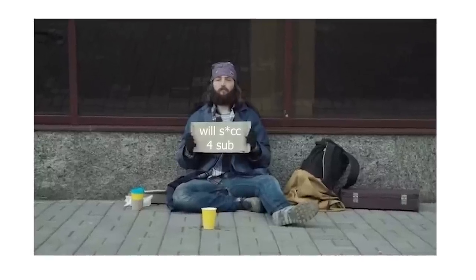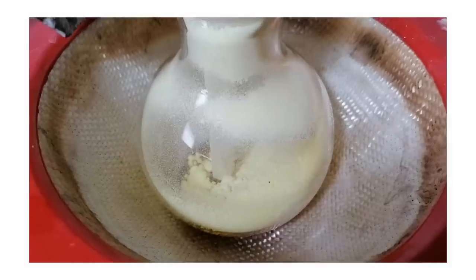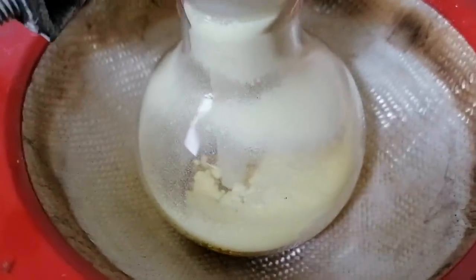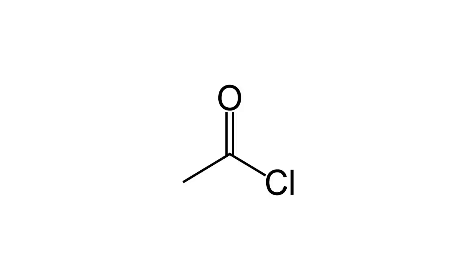As a poor slav I took the second route, and oh boy, I should have gone the expensive route because instead of a measly 3 hours or 5 mugs, this shit took me a month and by the end of this procedure I was pulling my hair out. So let's start with the beginning, which is sulfur chlorides. They are pretty much the only precursor of Acetic Anhydride available to an average chemist which isn't insanely expensive, like Acetyl Chloride.